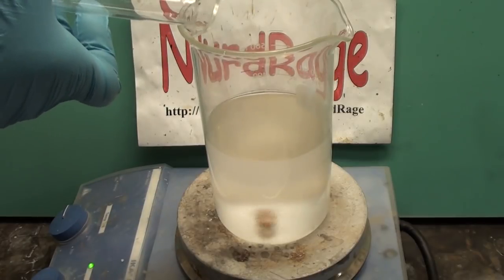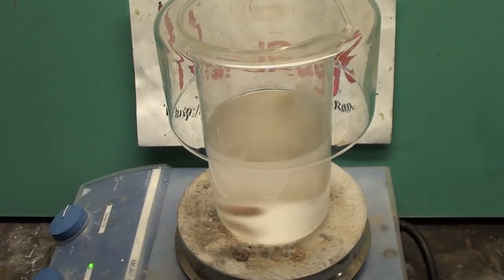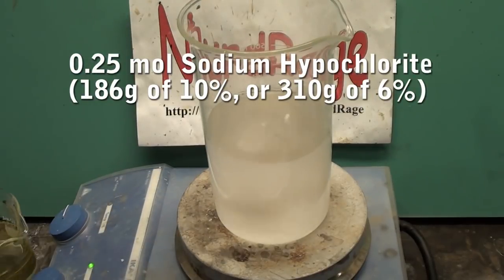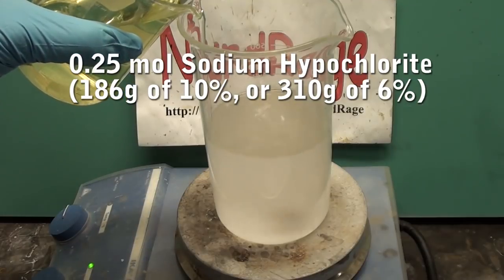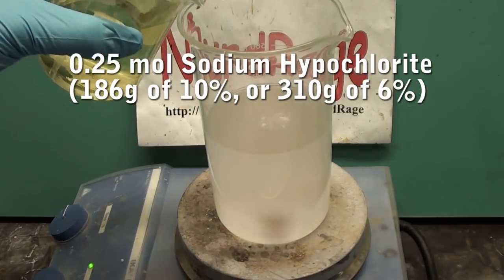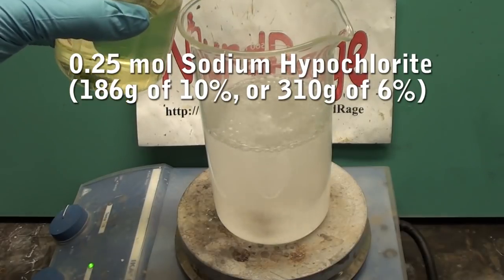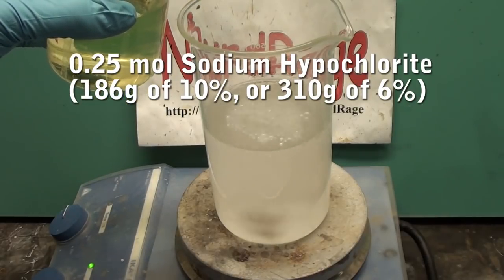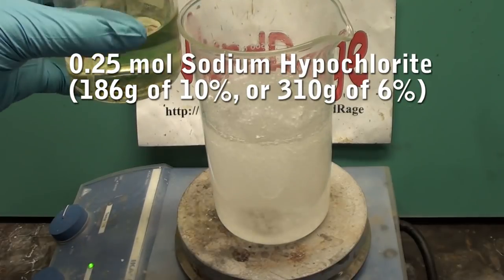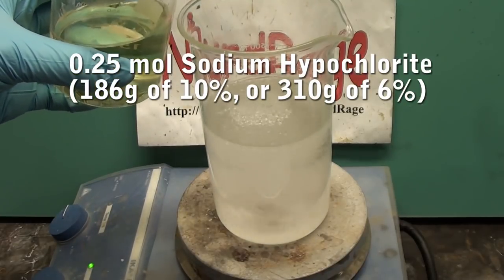Stir the ammonia and ketone vigorously for about 10 minutes to thoroughly mix them. Now while it's still stirring, add in a quarter mole equivalent of sodium hypochlorite solution, also known as chlorine bleach. I'm using a 10% solution so I'm adding in 186g. This reaction also works very well with 6% household bleach, but you'll need to use more, around 300g.